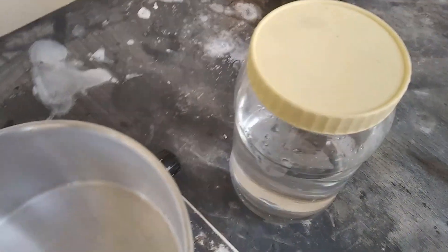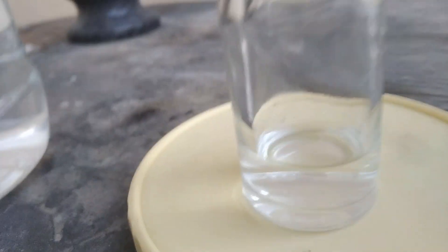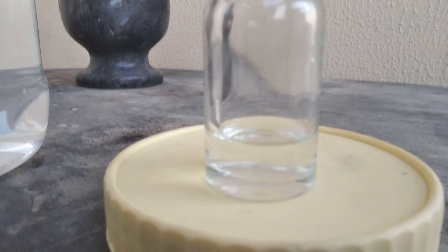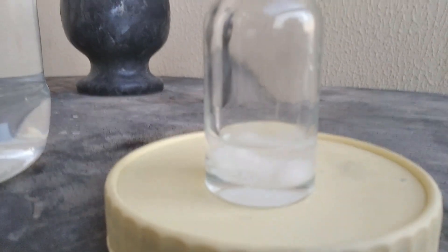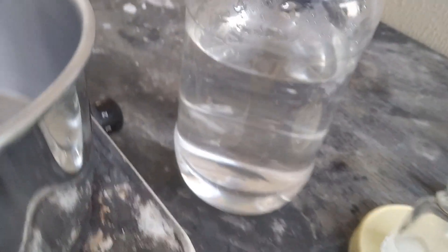Here's another run-over perchlorate cell — it's run to completion. Here is our test solution: this is potassium chloride. Let's zoom in here. Look how fast that precipitate is forming. This is more than a liter of solution, so you can imagine how much precipitate is in here.